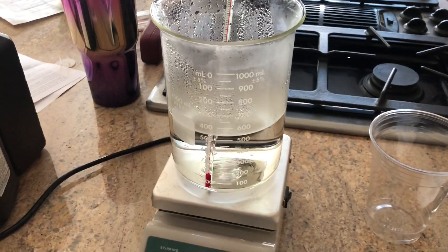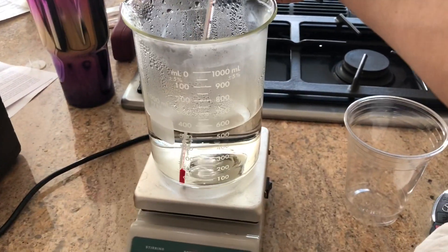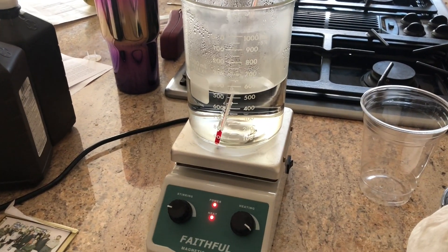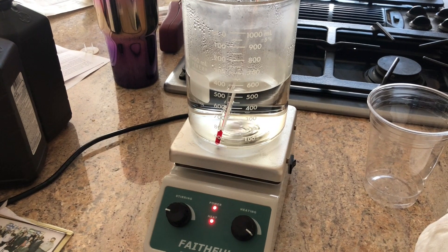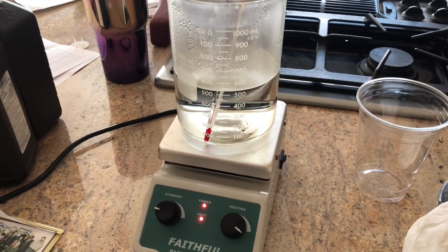This is about 4 hours later. I guess I got to about 90 C, maybe halfway done. So right now it's only about 6% so not very concentrated.